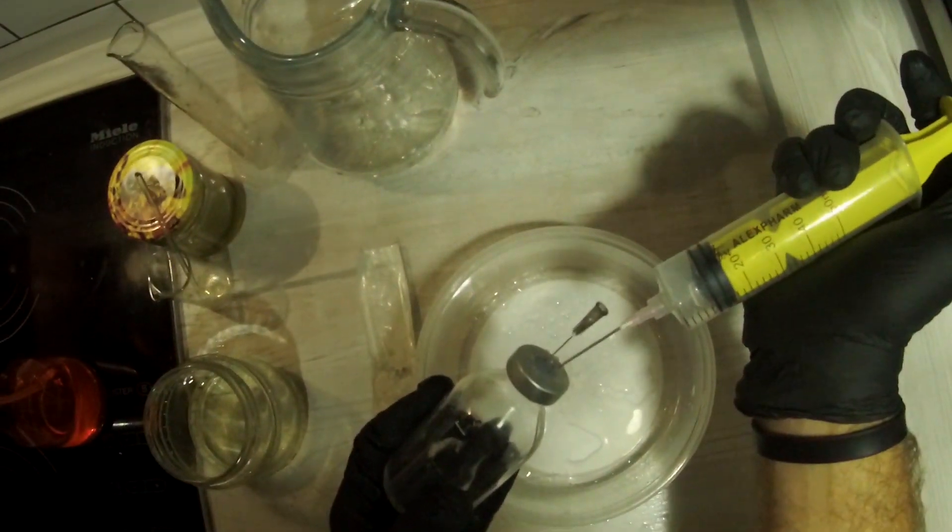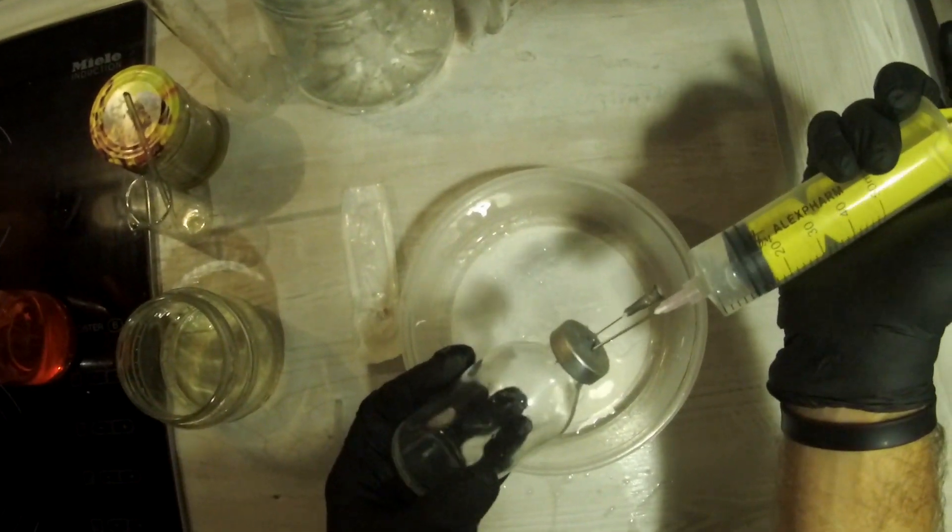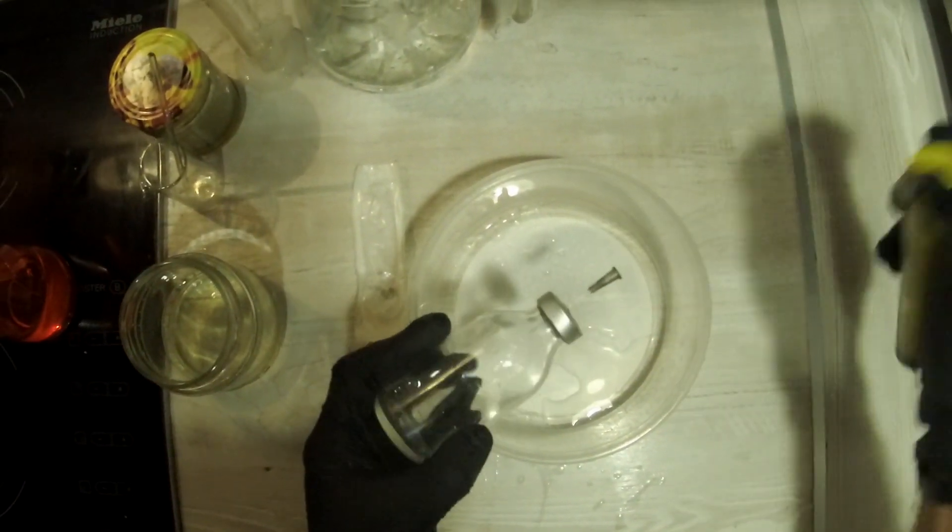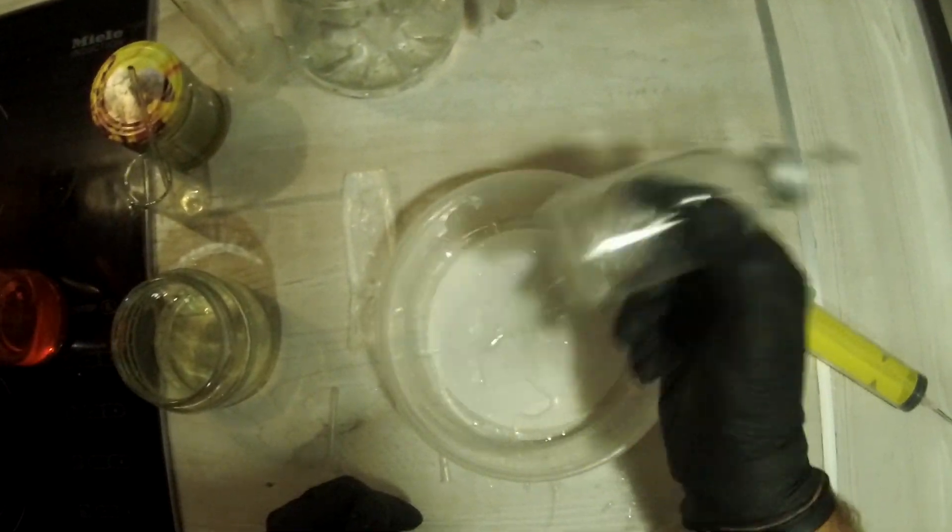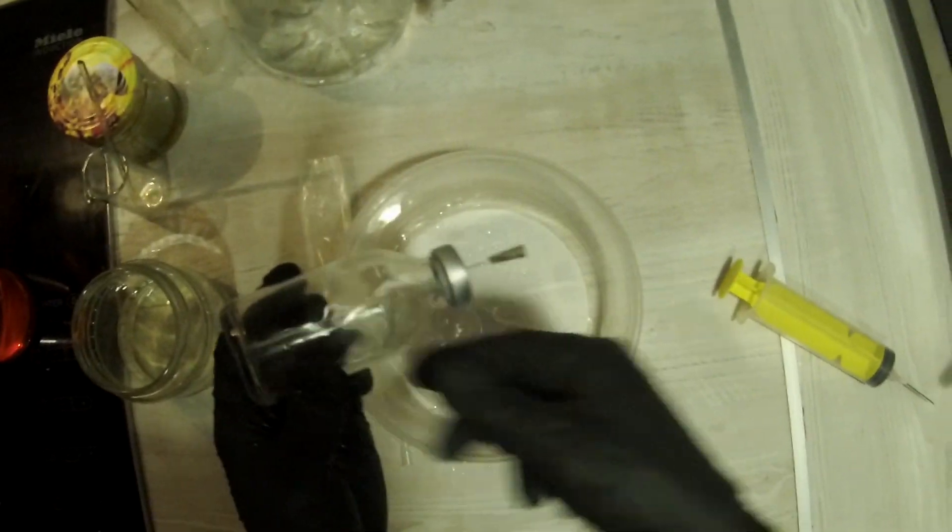If you just use a single needle, then the pressure inside will be working against you. So we will insert two needles. One of them will be acting as a reverse bleed valve.